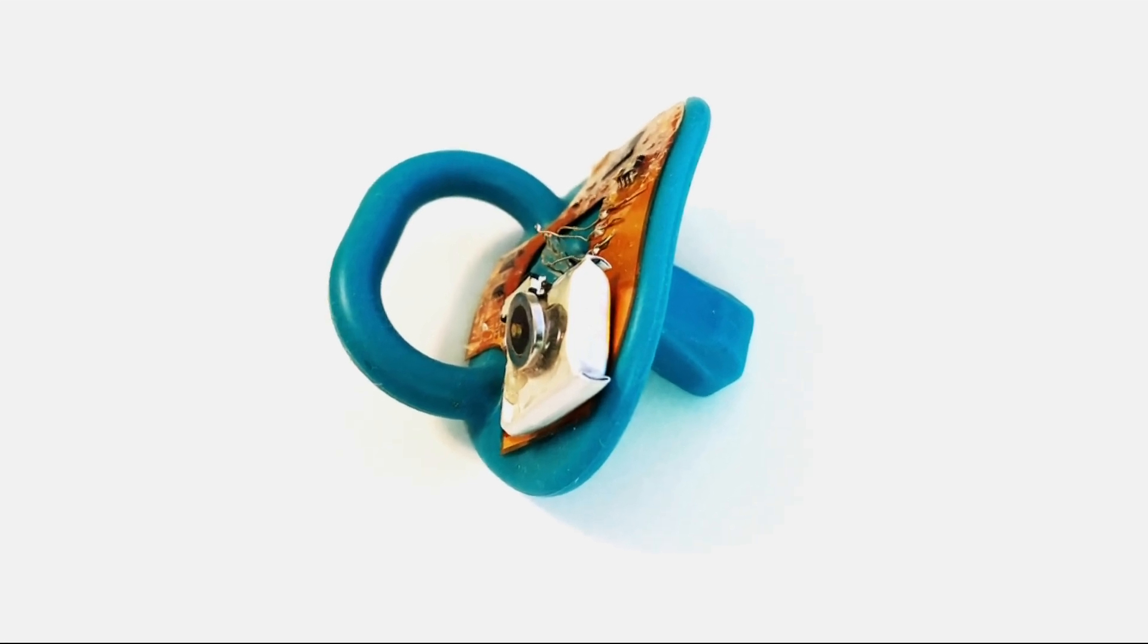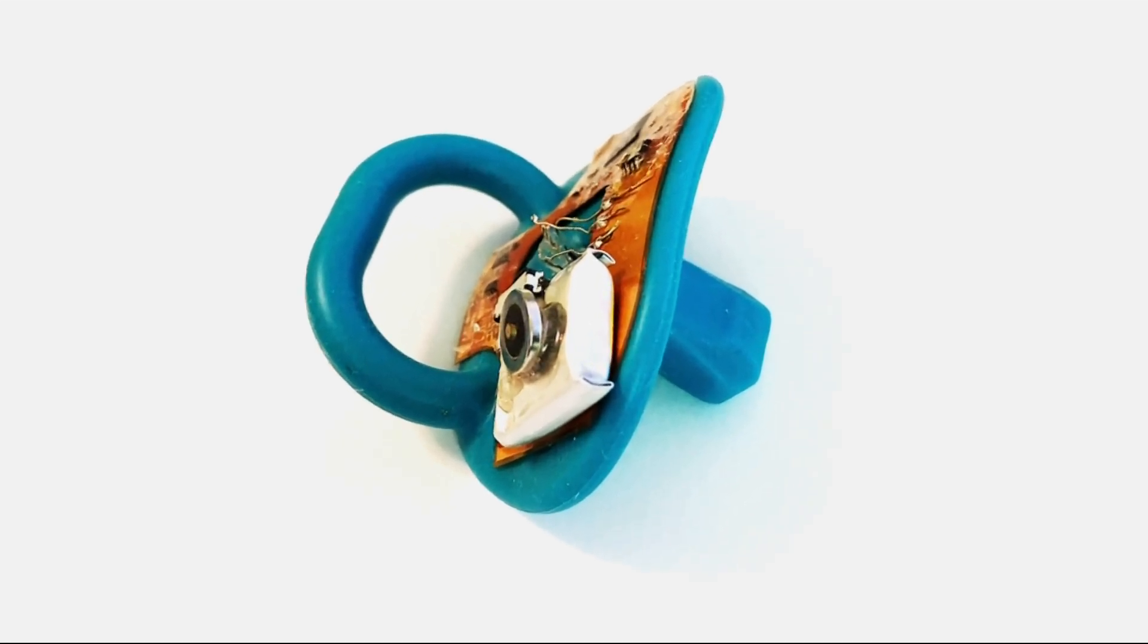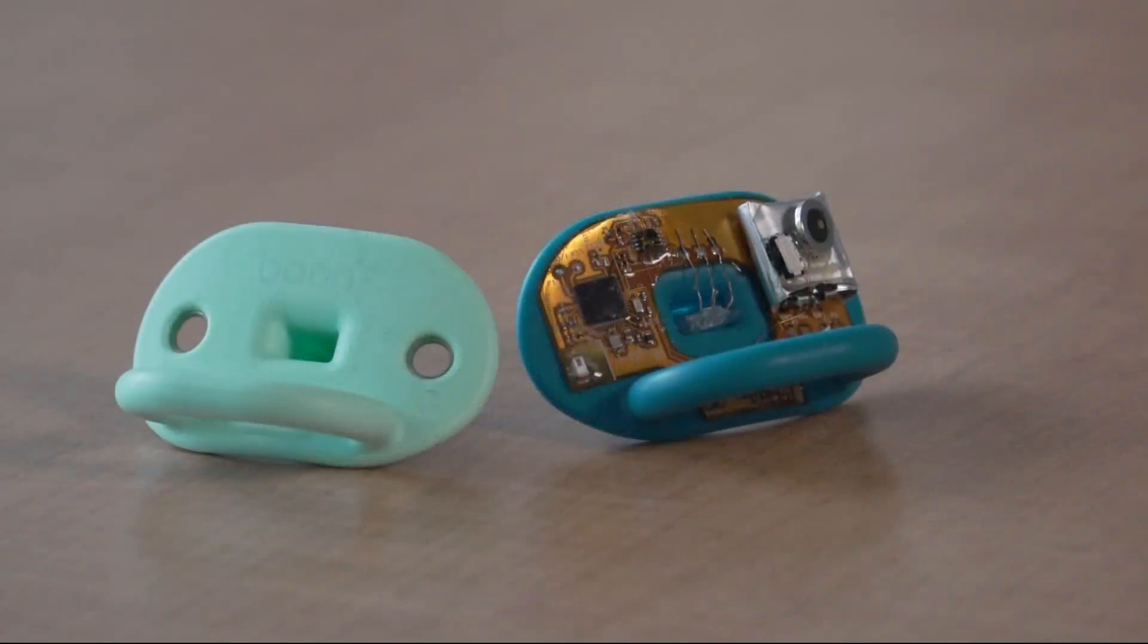They call it a smart pacifier, and it is. Although other than some lightweight electronics, it's not any different than the ones babies put in their mouths all the time. Basically, every baby enjoys playing with this pacifier.